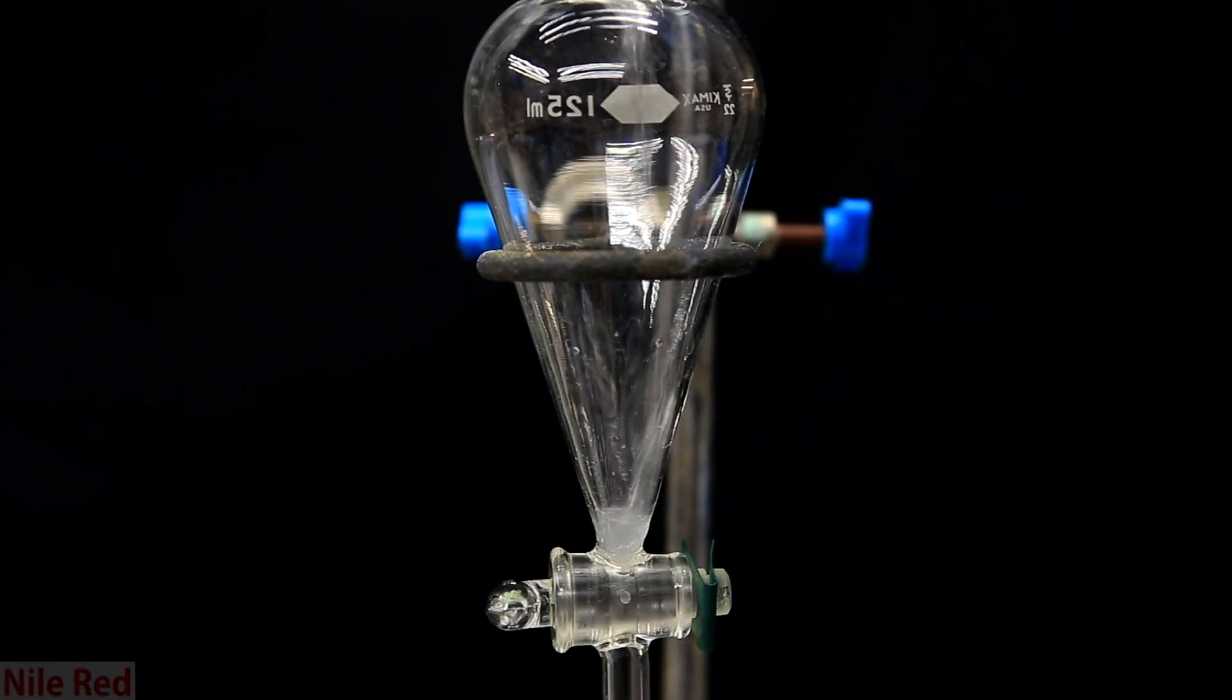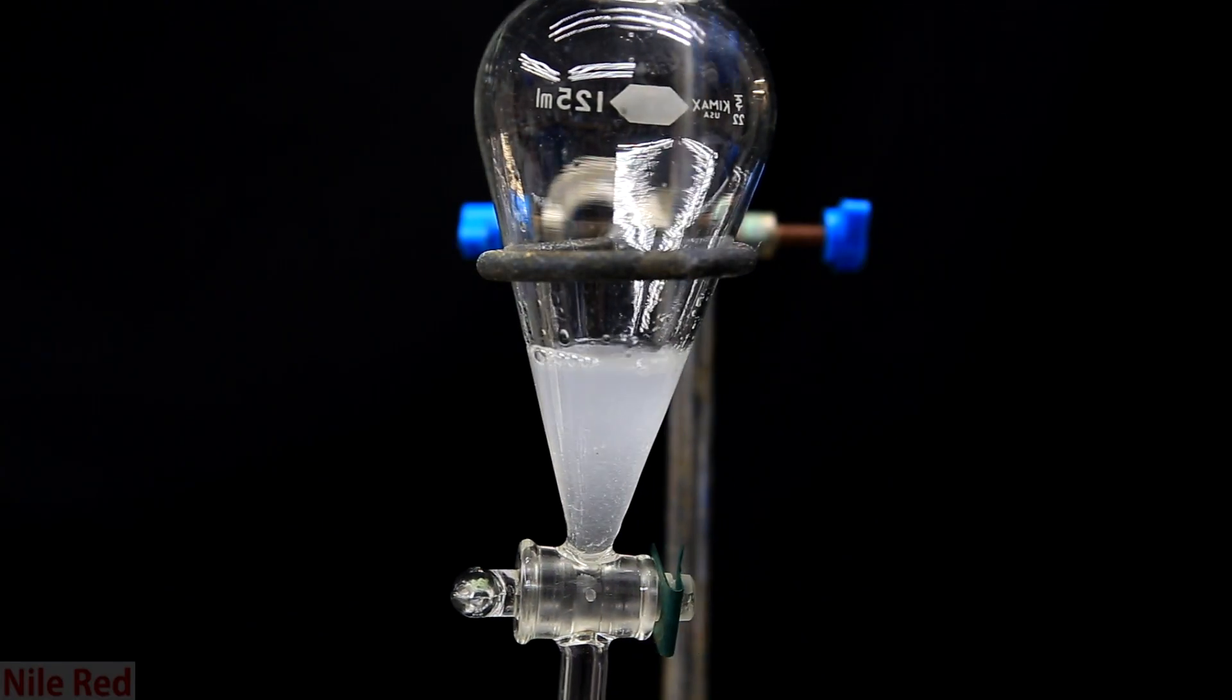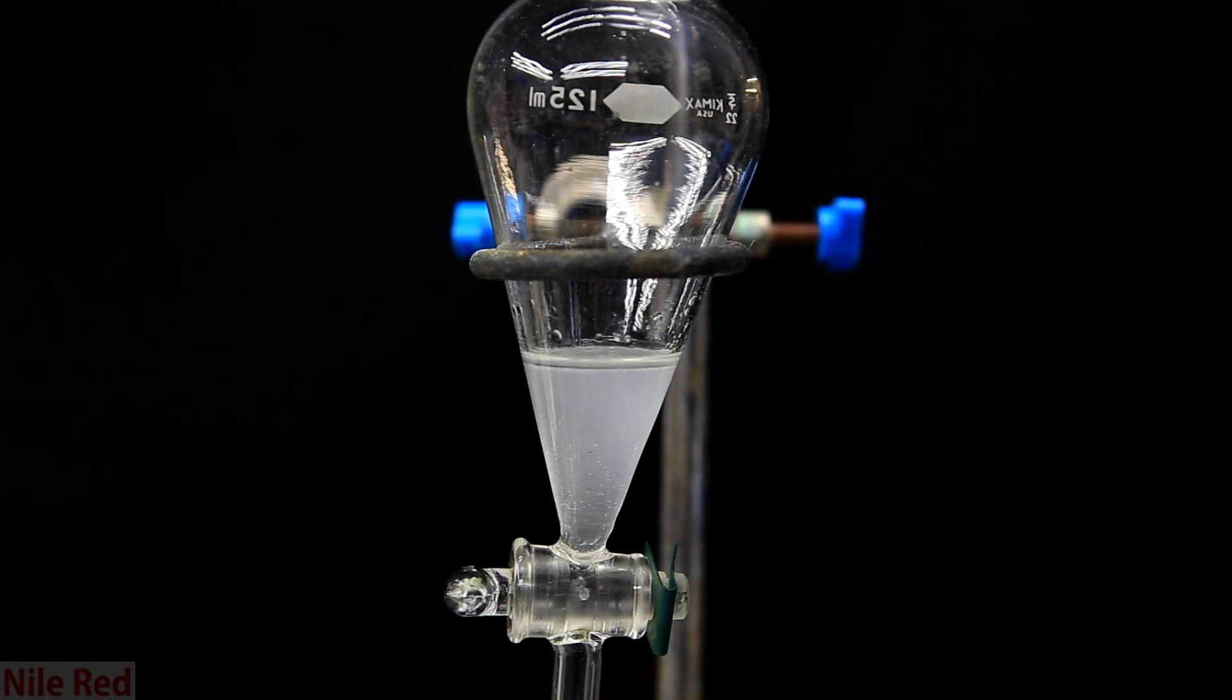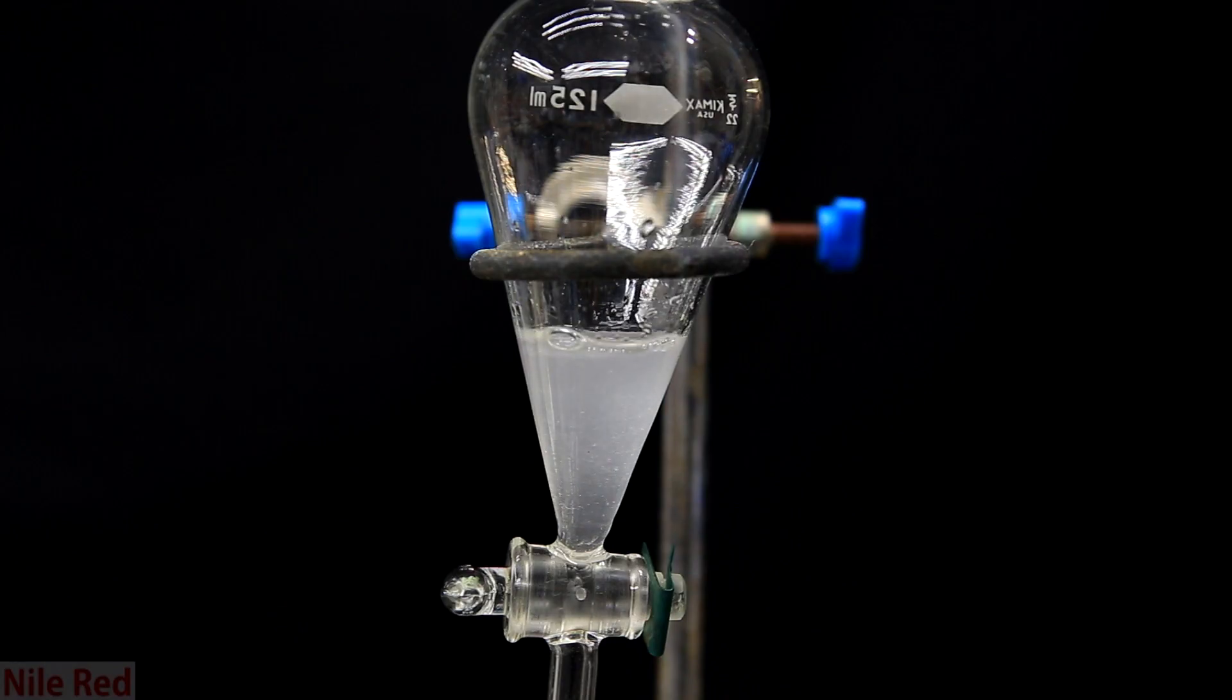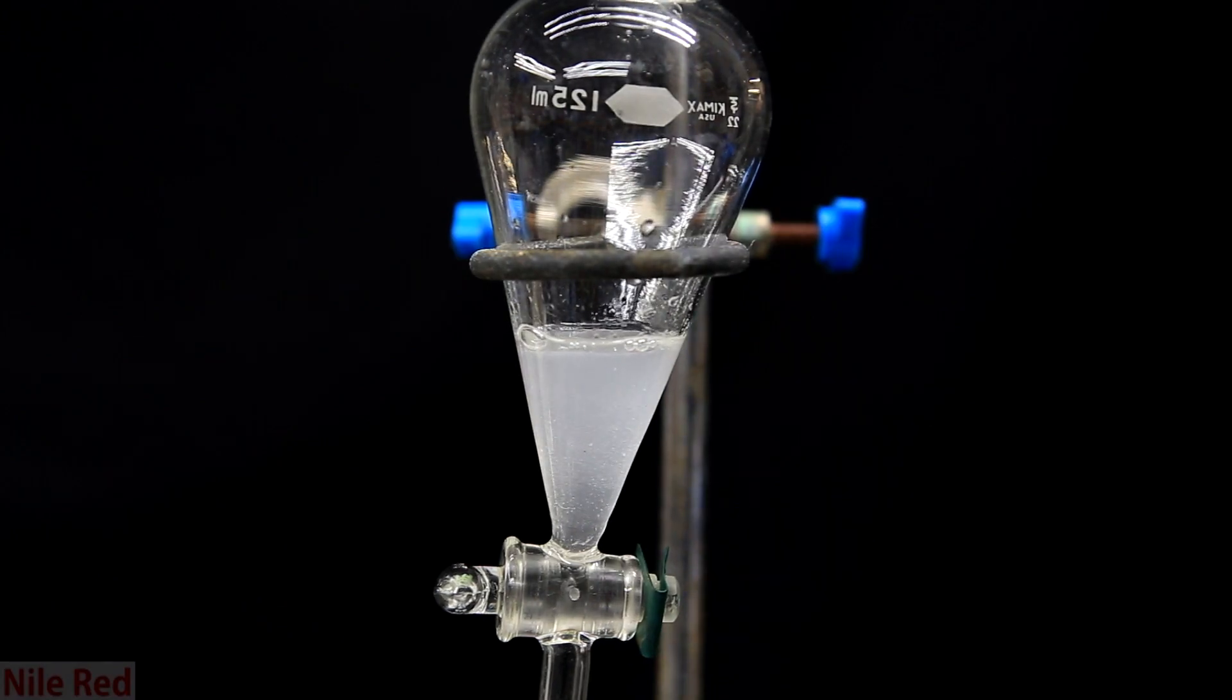Once we're pretty sure everything's been quenched I add it to a separatory funnel. Just for good measure the flask is washed again with a little bit of water which is also added to the separatory funnel.